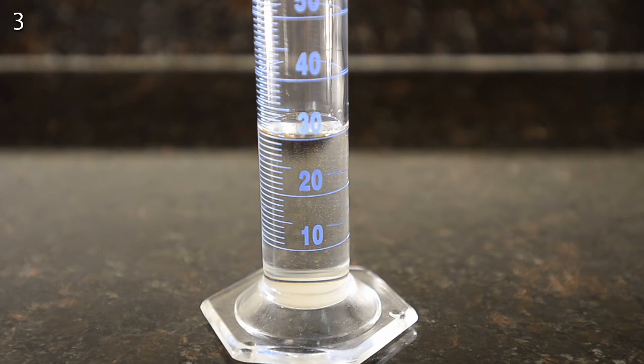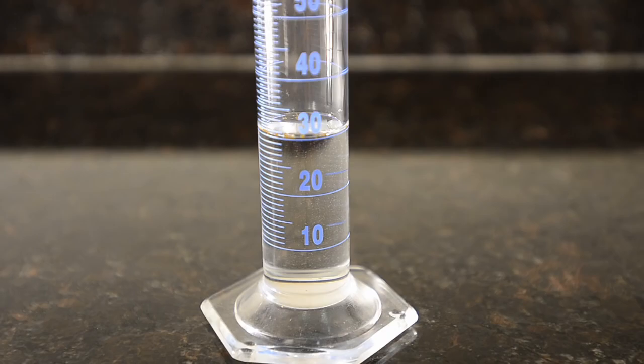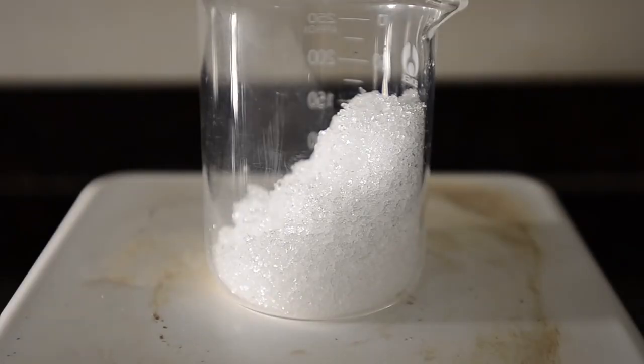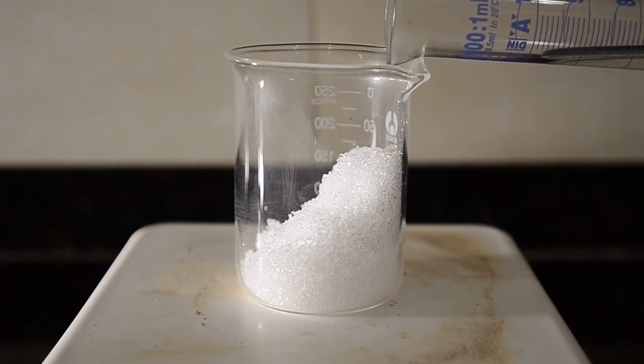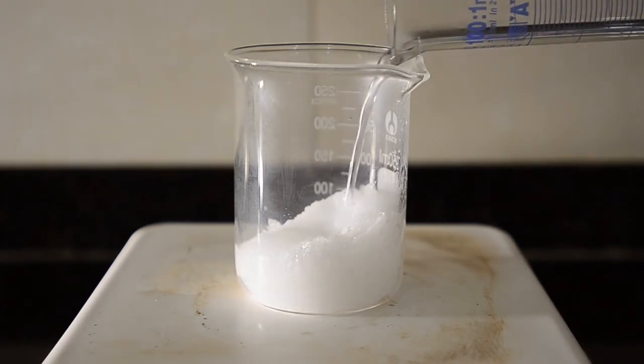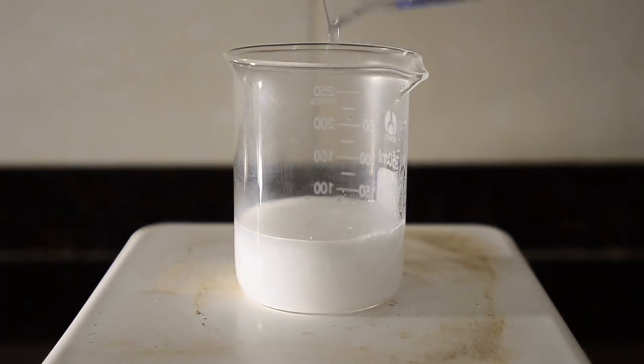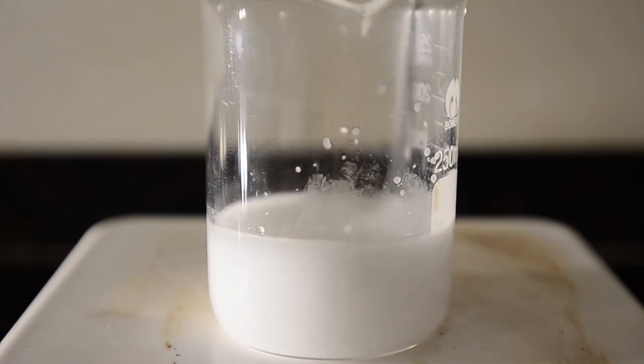So we measured out 30 mils of concentrated hydrochloric acid initially. This is half the molar equivalent. We placed the salt on a hot plate and then added the acid to the crystals. These seemed to dissolve and a much whiter colored solid appeared in the suspension. This is a good sign that sodium chloride is being created and precipitated due to the concentration.